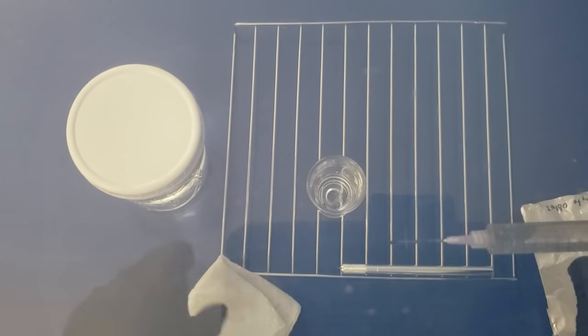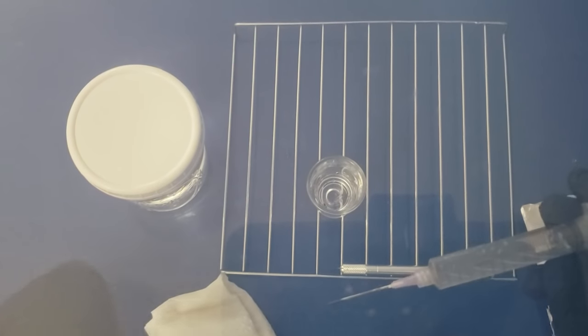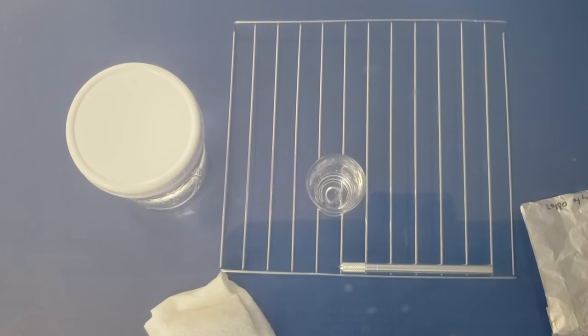Once that's done, I'll go ahead and wipe the needle tip here with isopropyl alcohol. Keep it sterilized and we'll put the cap back on the syringe. And there you have it, that's how you make a spore syringe.